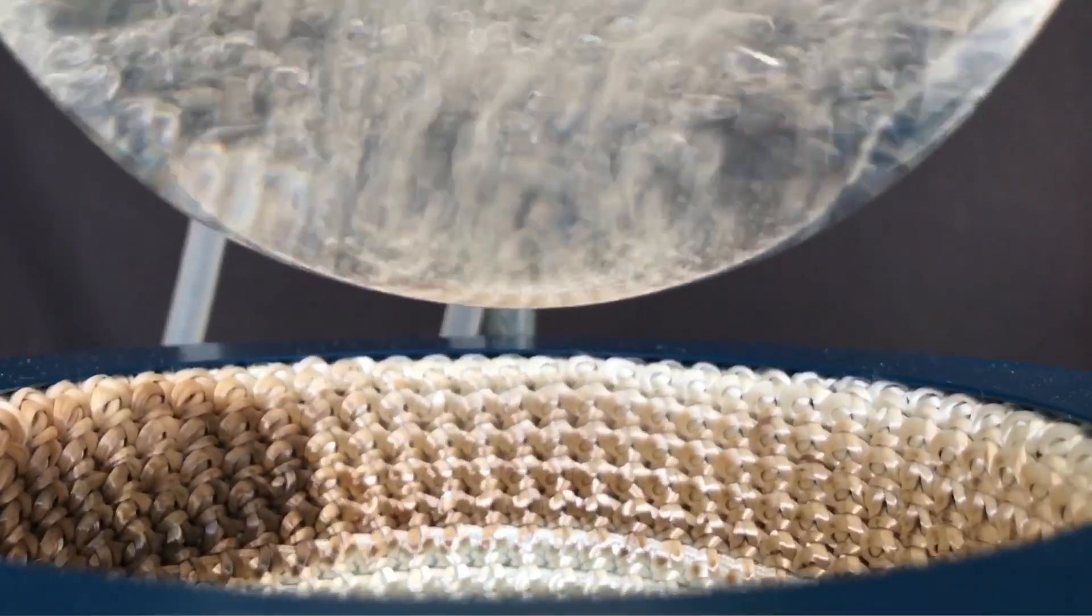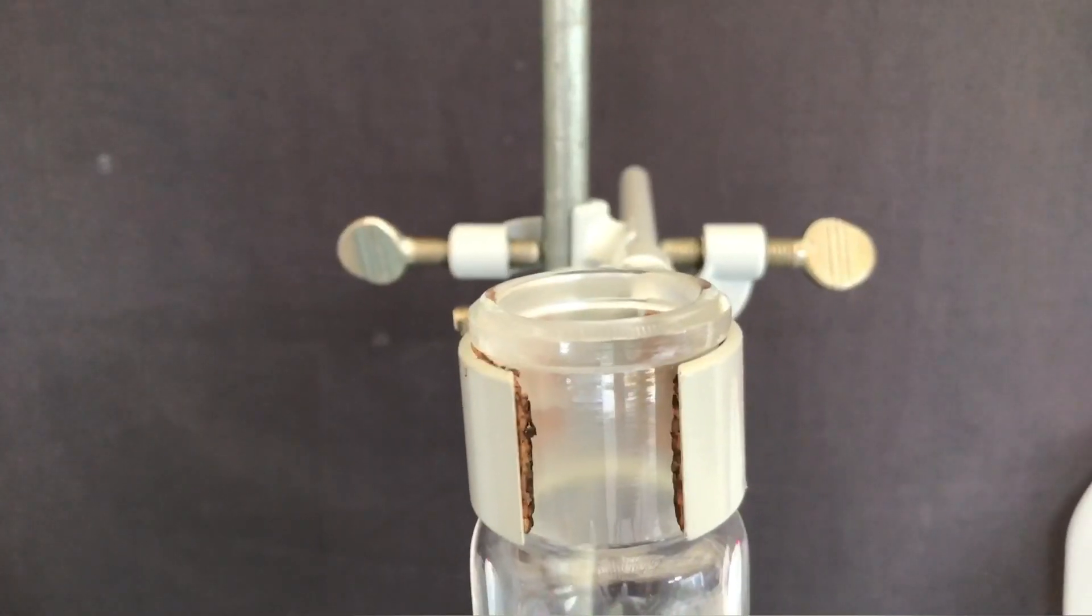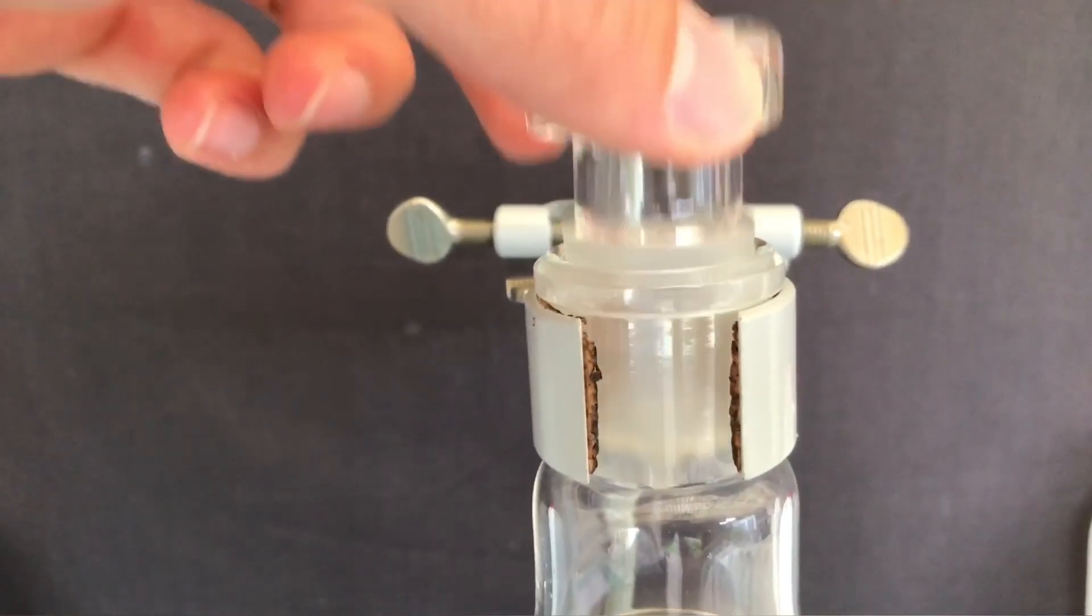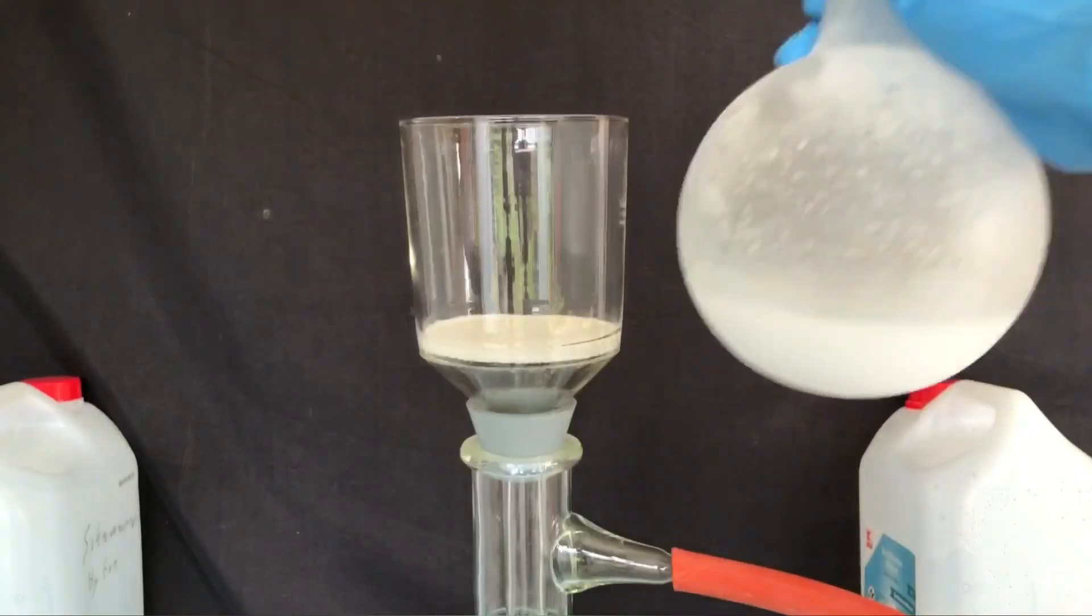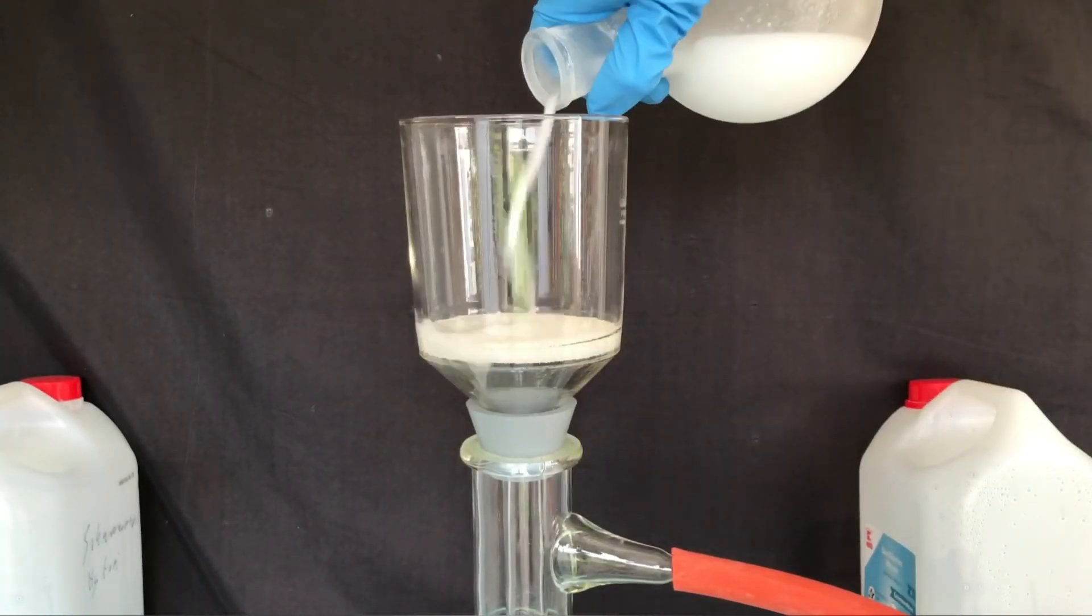As you can see, even though it's still boiling, there's no solid left in the flask. The moment it was cold enough, the flask was stoppered and placed into the freezer for 2 hours. And here we are 2 hours later.